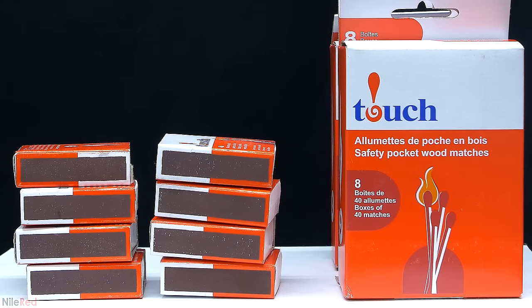Red phosphorus is commonly used on matched striker pads and it's pretty much the only source of elemental phosphorus for the average person.